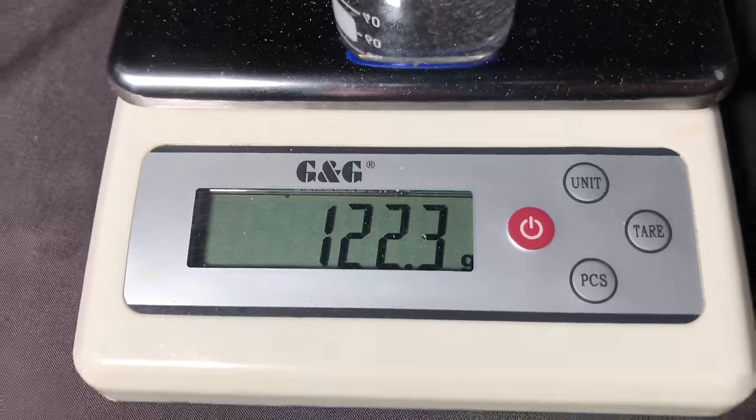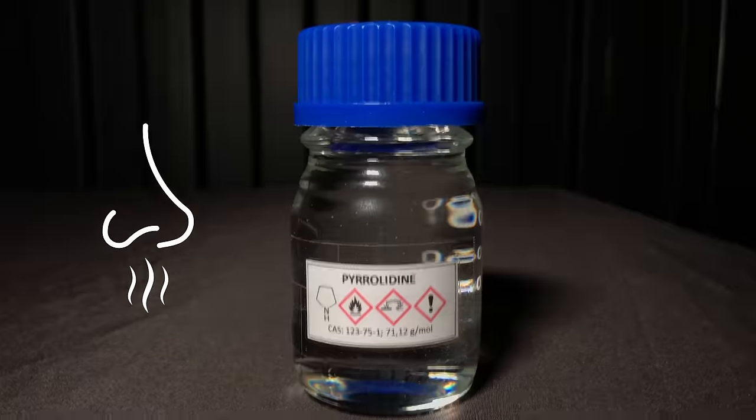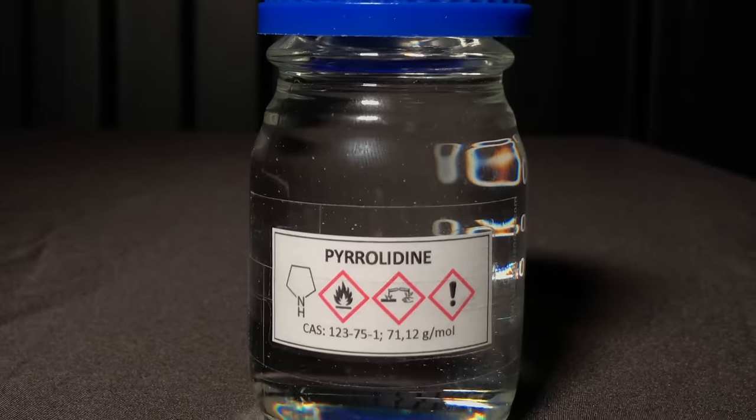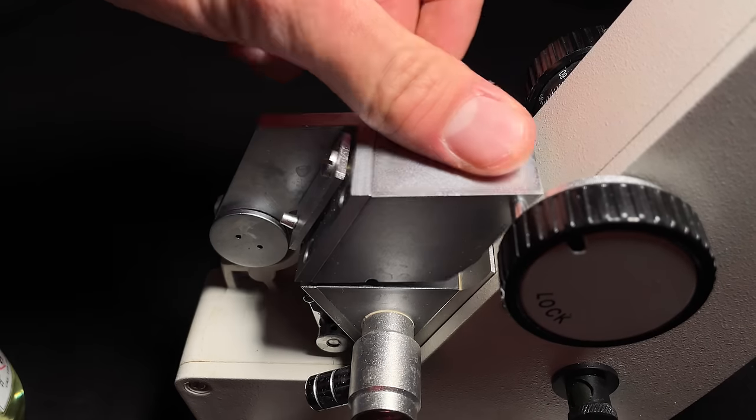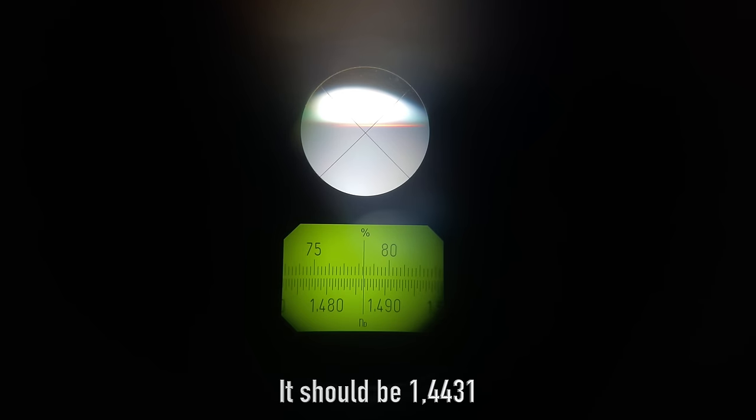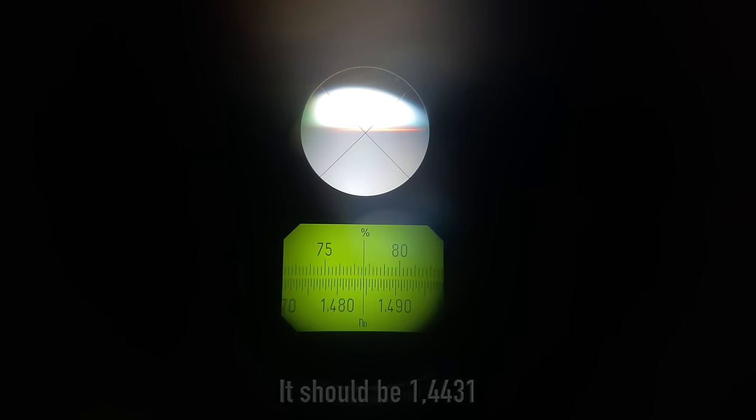Our first indicator of purity is that the boiling point matches the theoretical one. In the end, 122.3 grams of nasty were obtained. This represents an 85.3% yield. I measured the refractive index and it was way too high, which means that it's still impure. For our purposes however, this should be pure enough.